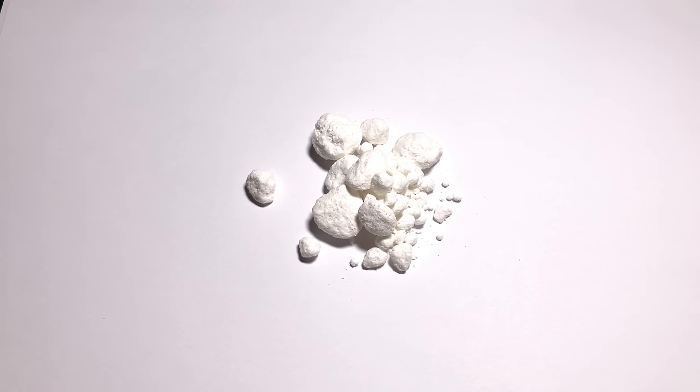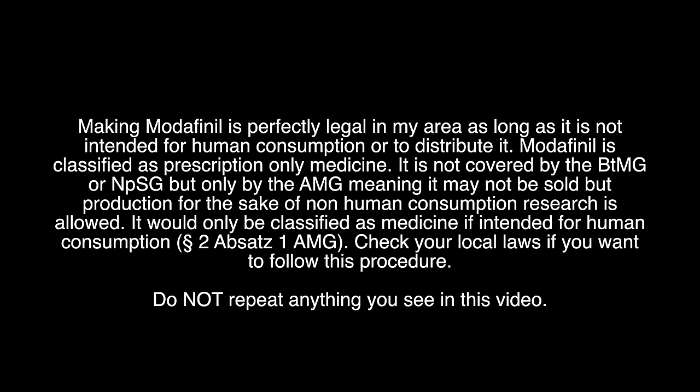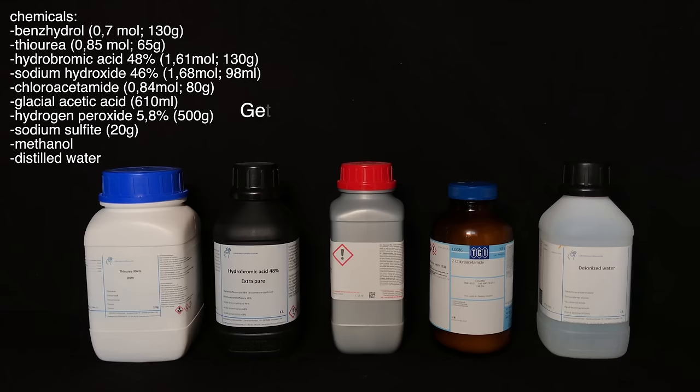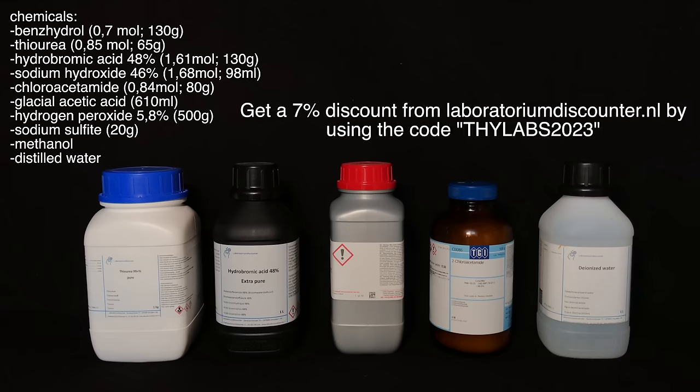It is legal for me to make, as long as it is not intended for human consumption or for selling it, but legality depends on location, so I don't want to take any responsibility. To make Modafinil, you are going to need more chemicals than I could fit on the screen, but I listed all of them.